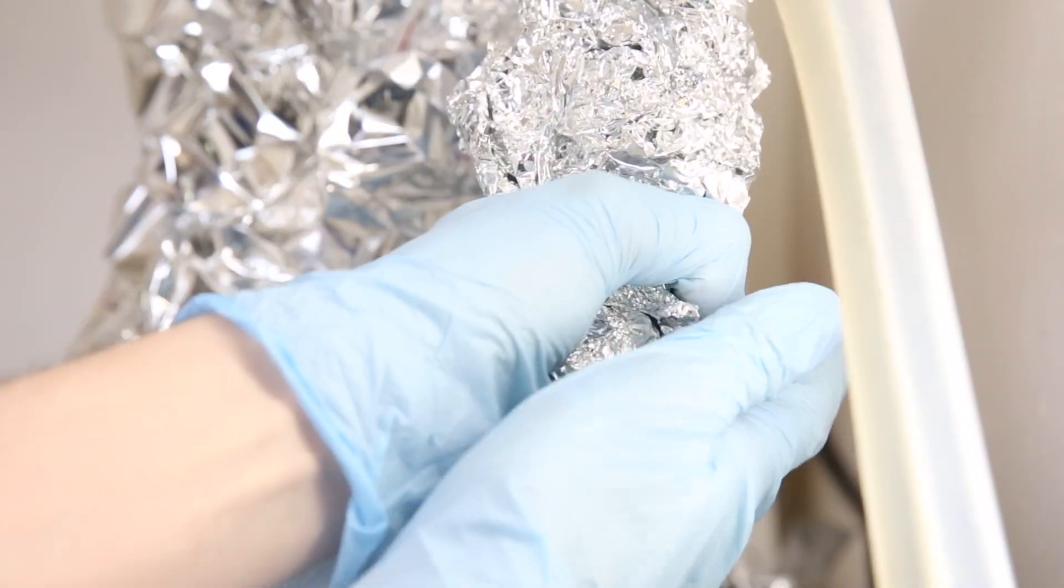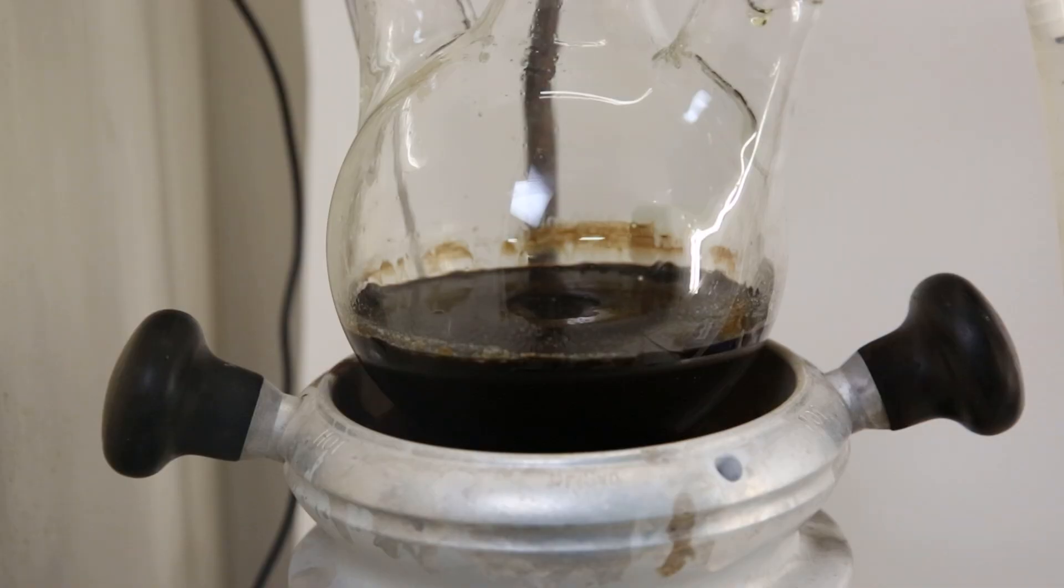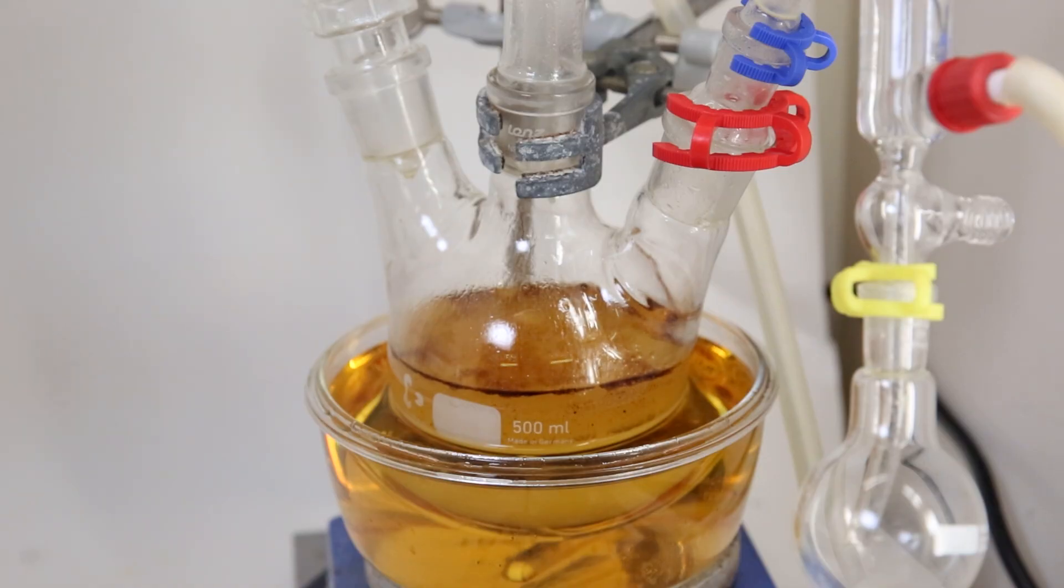I do this process a few more times until I feel like not much more is coming over. After I am done, all that is left in the flask is a thick black tar and the first receiving flask has a lot of liquid in it.